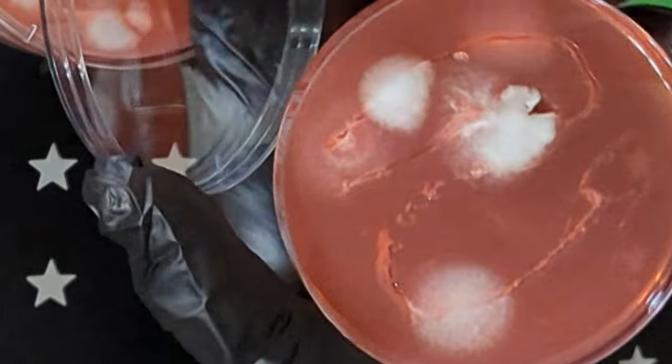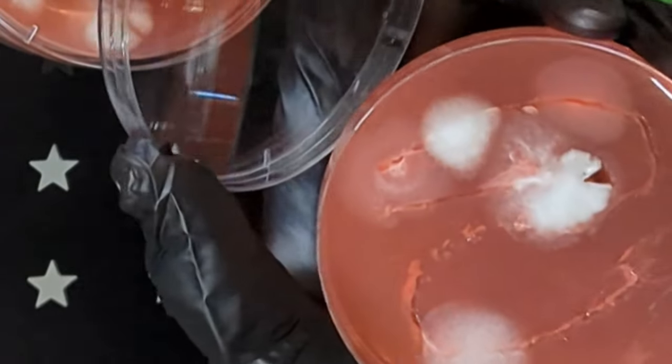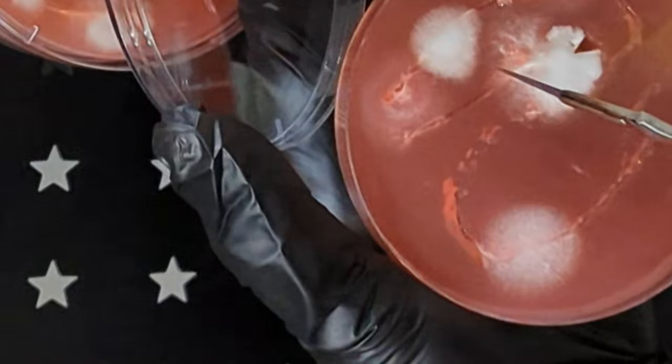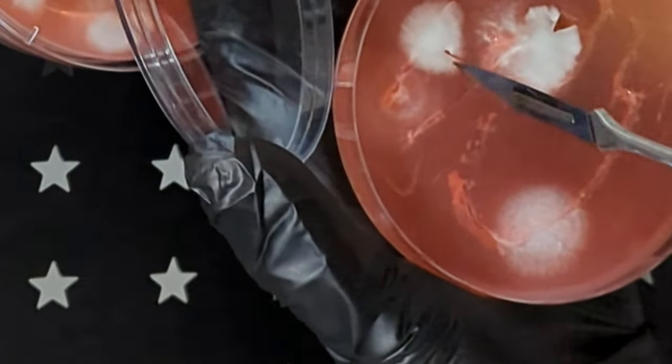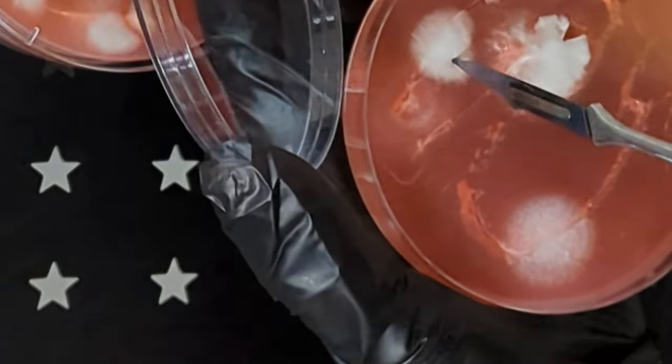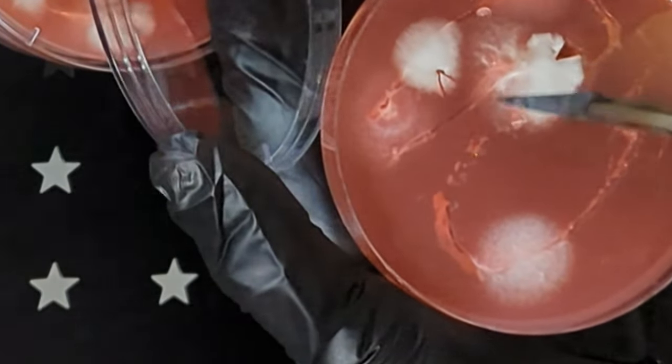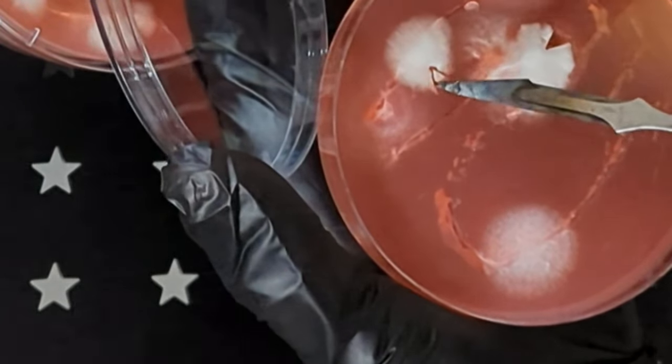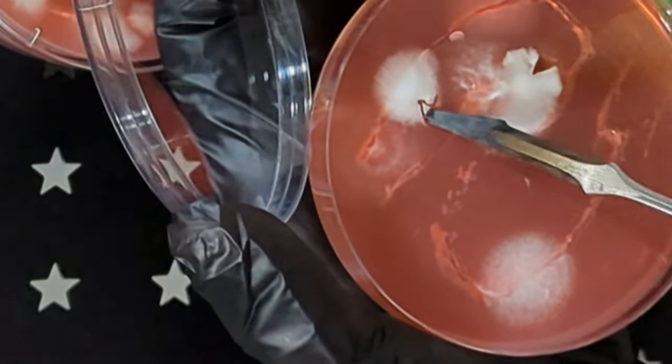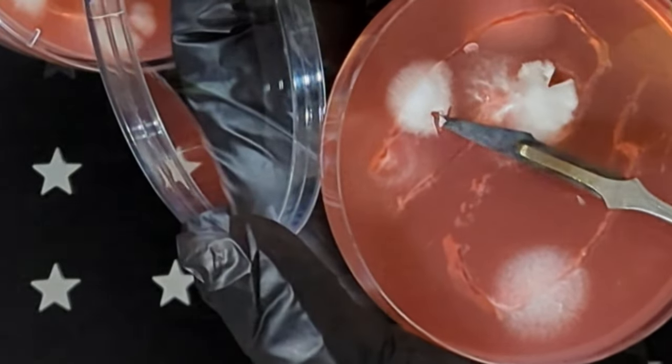When you first start working with mycelium on agar it can be hard to tell what you're looking at. Our mycelium has two basic looks: tomentose and rhizomorphic. Tomentose means wool or cotton-like. It's usually fluffy and can be very thick. It looks like someone took some cotton and stuck it in the agar.